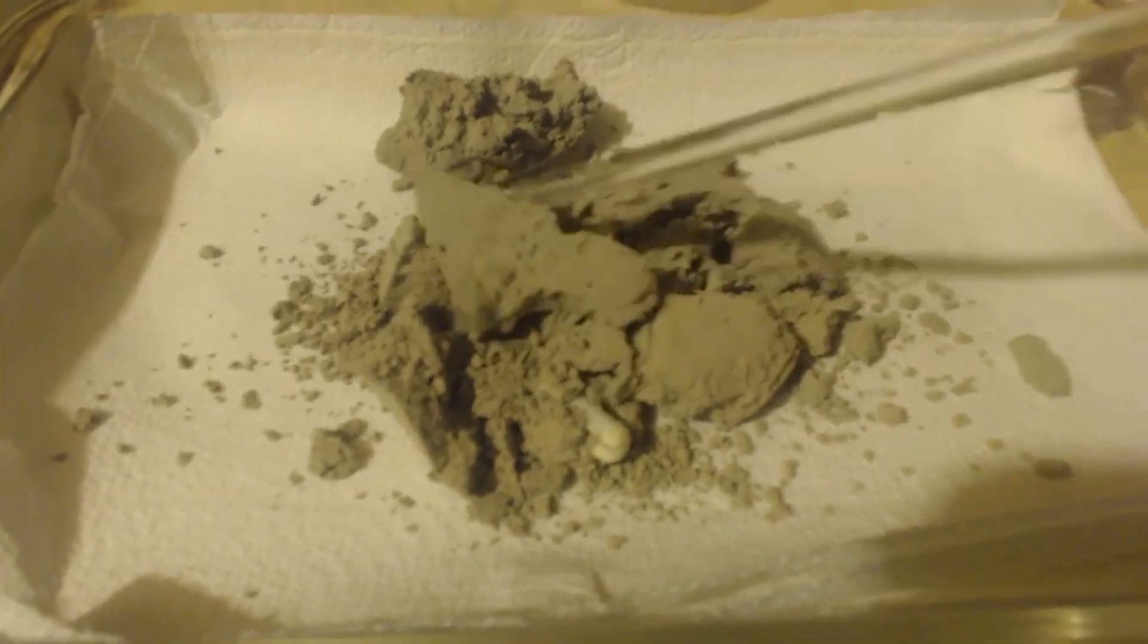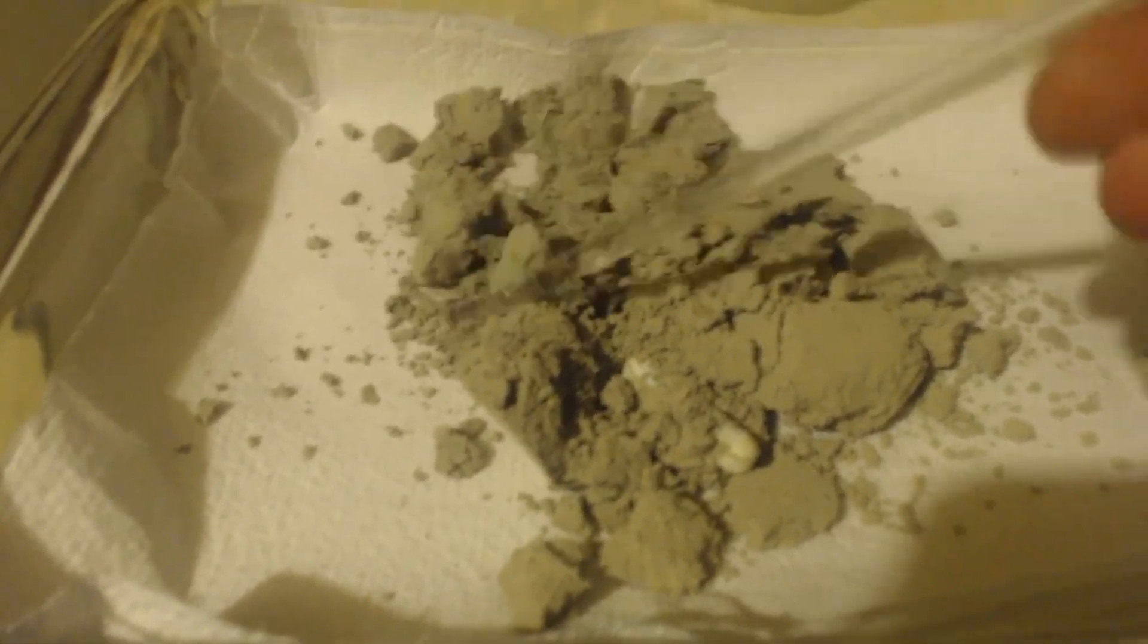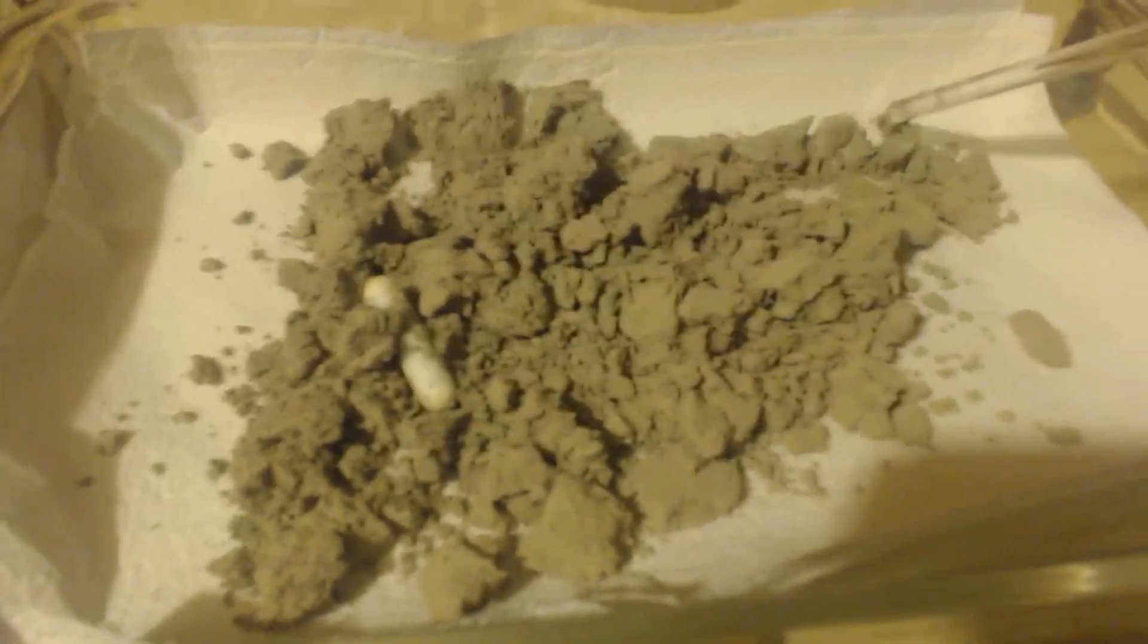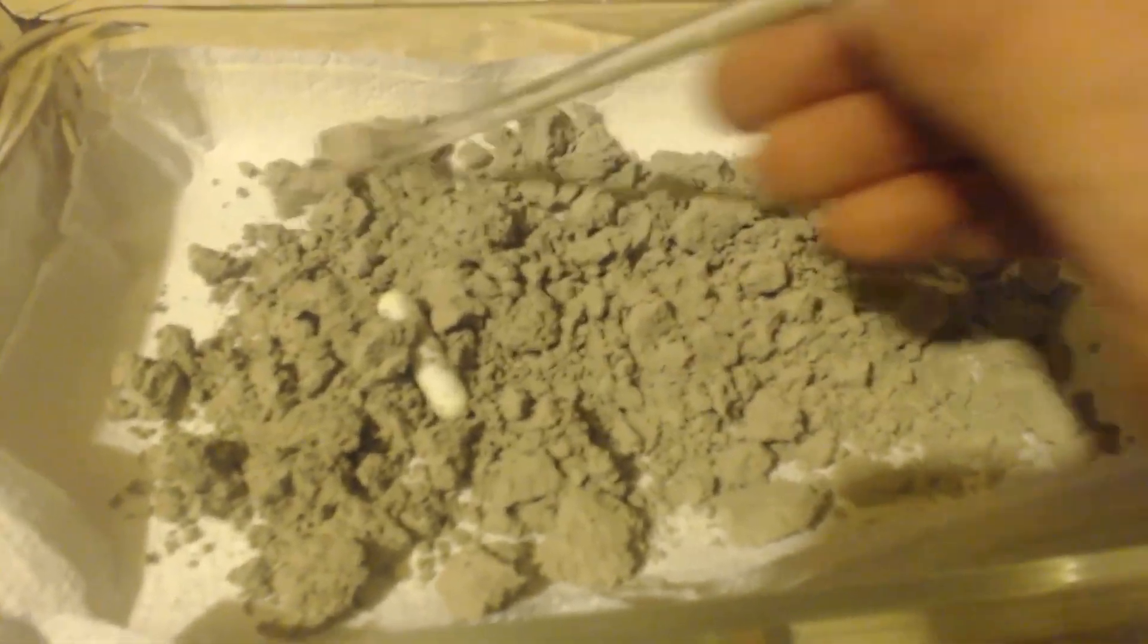So there's the solid. You can see I have it on some paper towel, and I'm going to spread it out, put it in some darkness, and let it dry up a little bit. Get that diethyl ether off there.